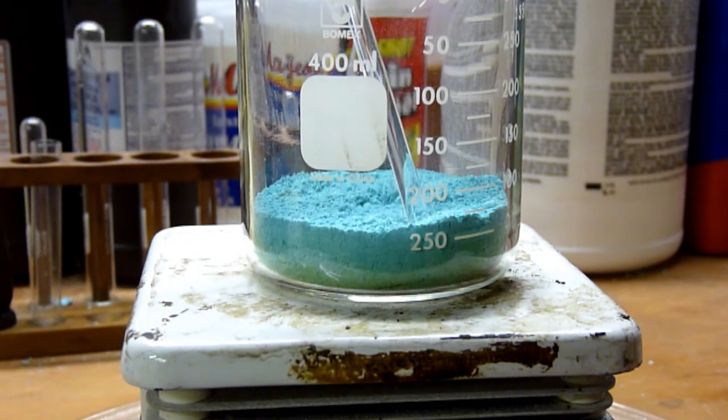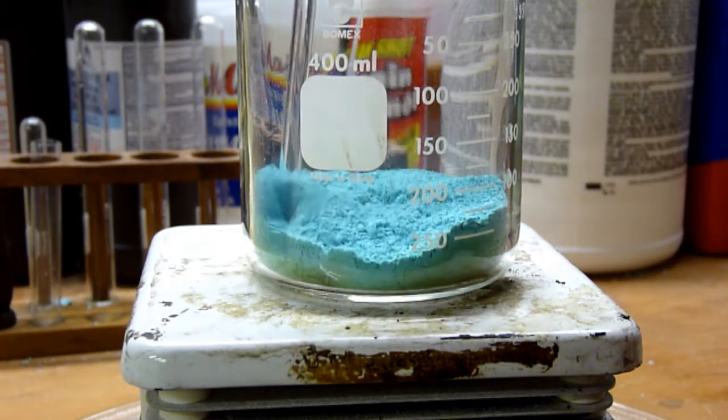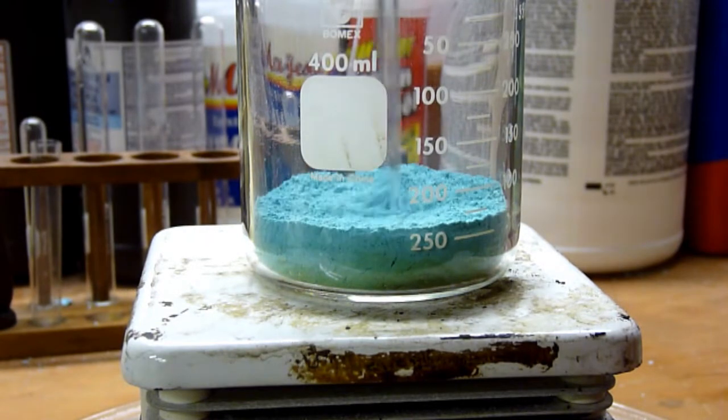You can see how it's getting greener near the bottom and then slowly to brown as it's decomposing into copper oxide. But first dehydrating.